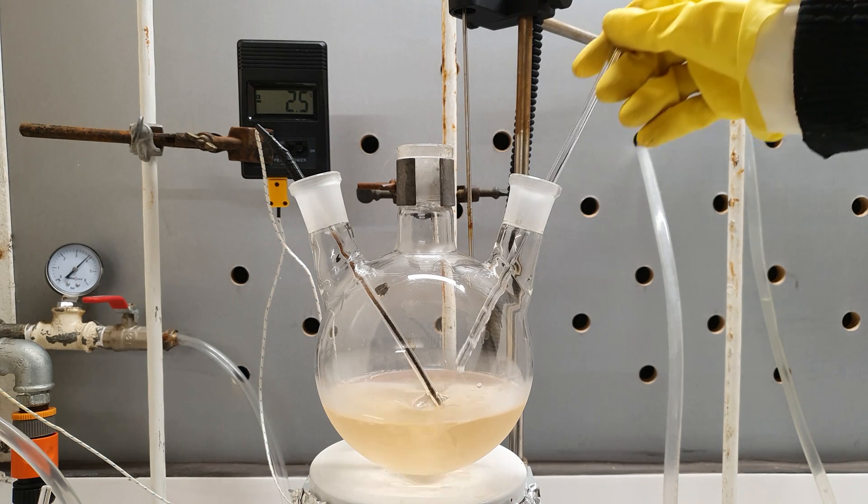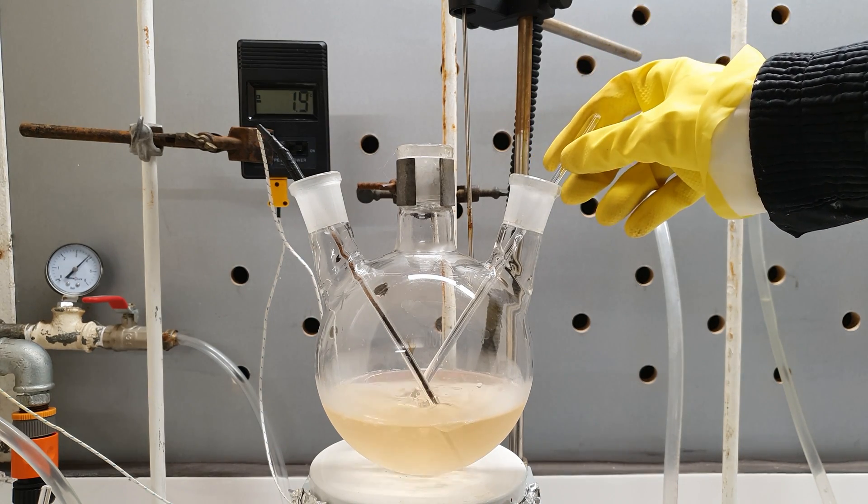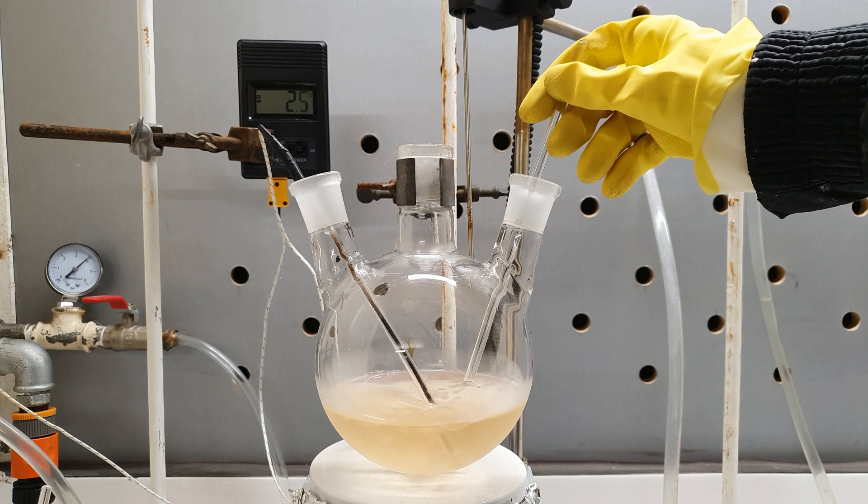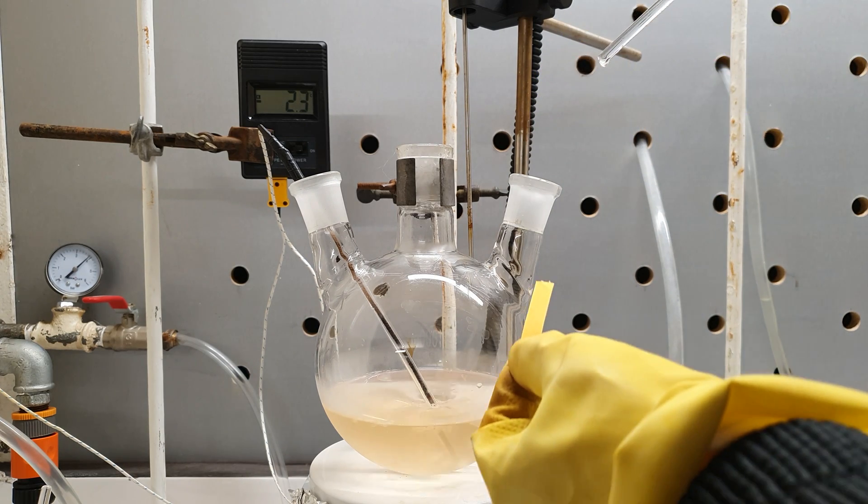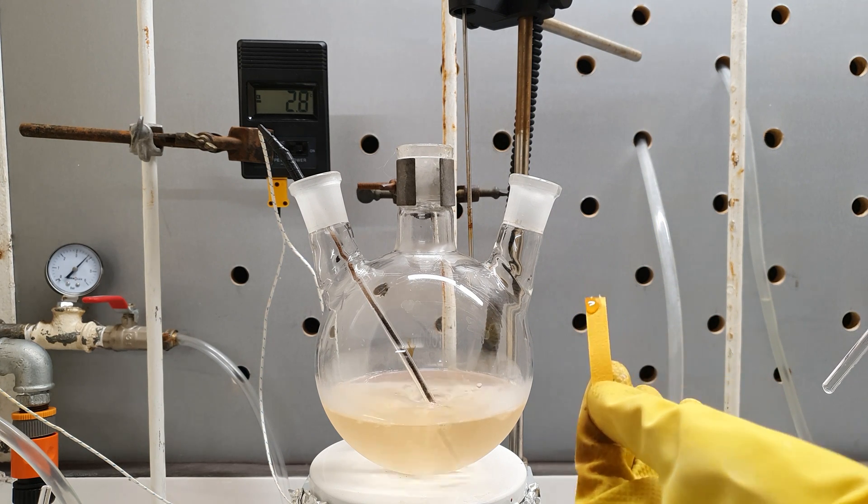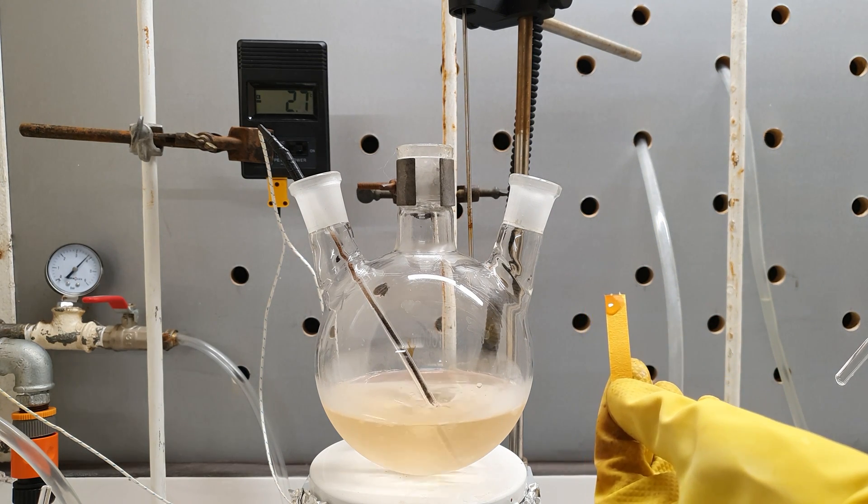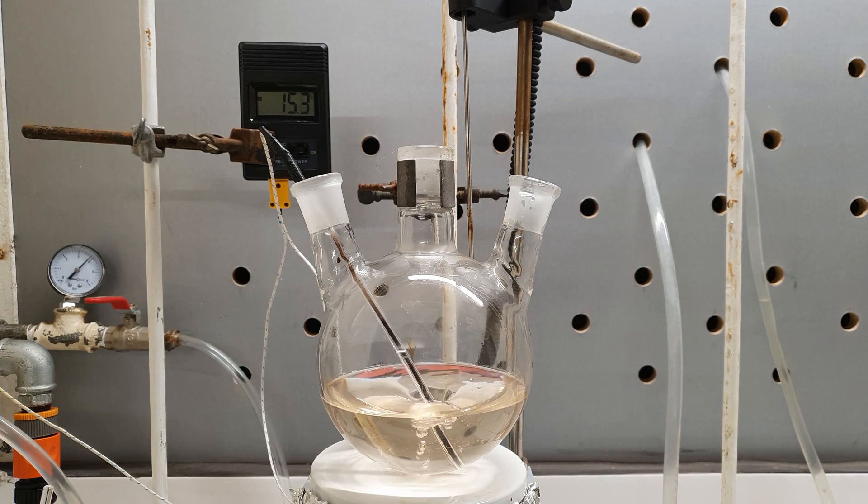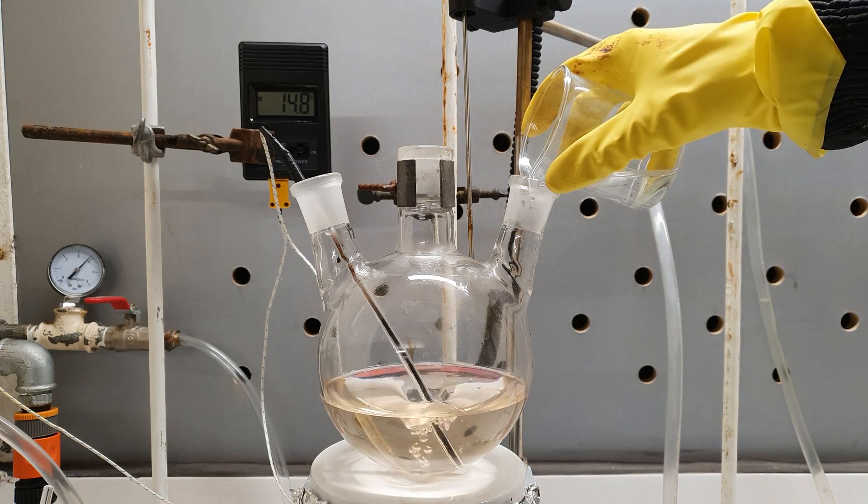When most of it was added, I started to take out samples on every few ml I added to check the pH. Here you can see it was almost neutral. We needed basic, so I kept adding more hydroxide.